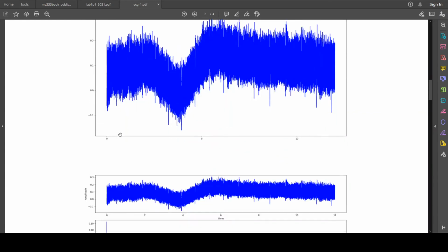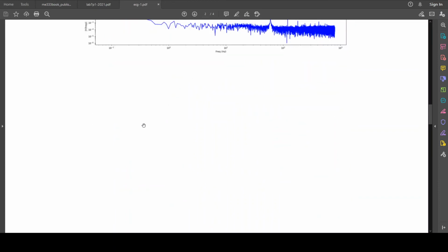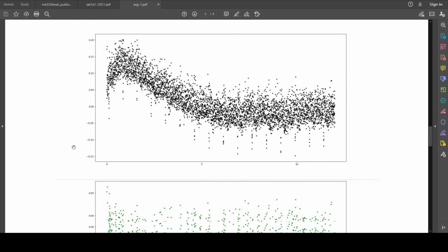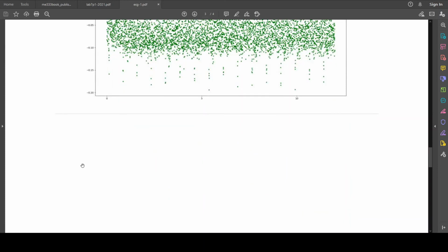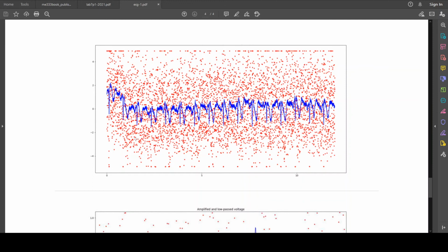Okay, so I picked a high-pass, low-pass, and gain, and I built that. Here is my raw signal again. I took some more data, and we can see there's still some drift. This is straight out of the instrumentation op amp. Here's that signal after the high-pass filter, so I was able to remove the drift, but it's still noisy. And then finally, the red signal is the raw signal amplified. One bad thing about this is that I did let it clip. You can see my gain's a little bit too big here.